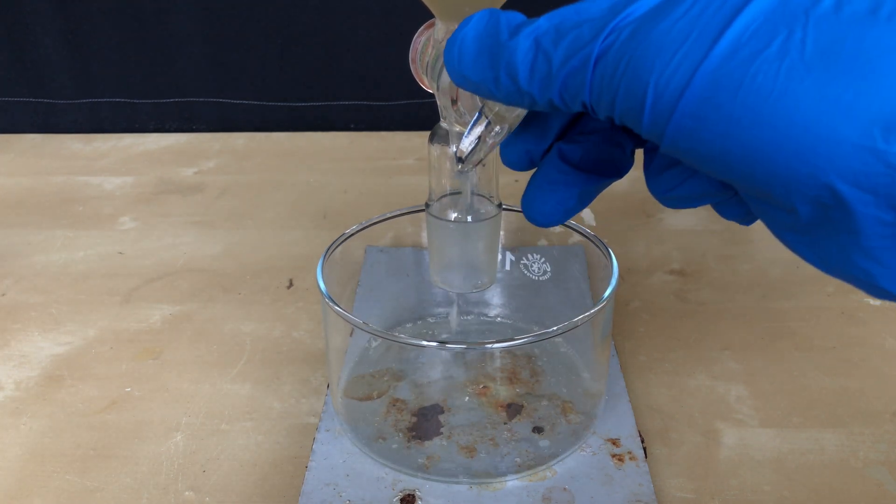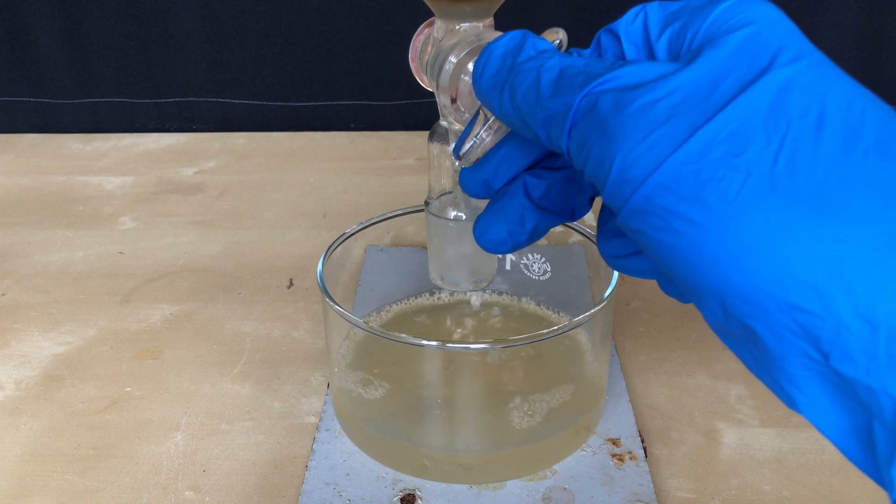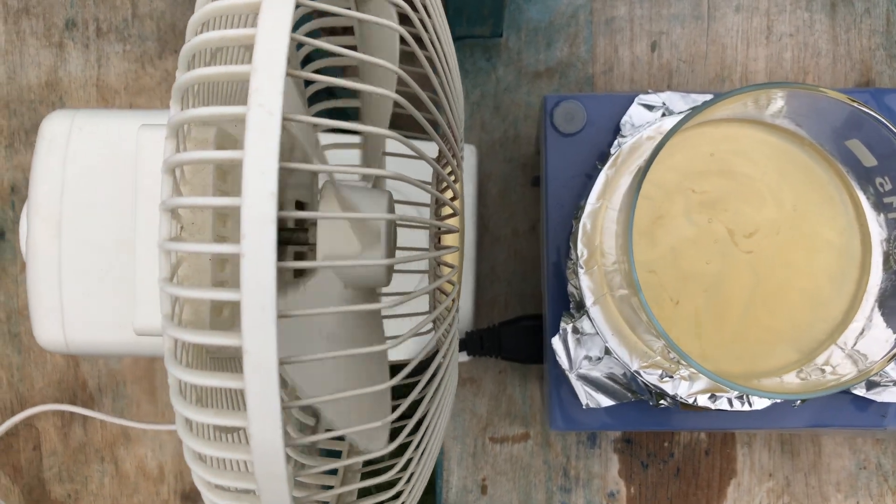The DCM layer was simply drained off into an evaporating dish and the solvent was evaporated using a fan and a hot plate on low heat. Half an hour later we were left with this solid.